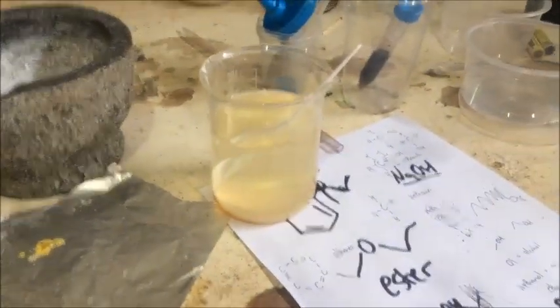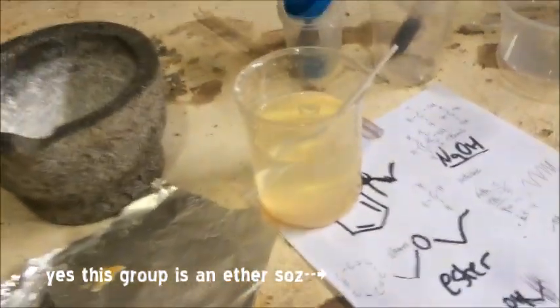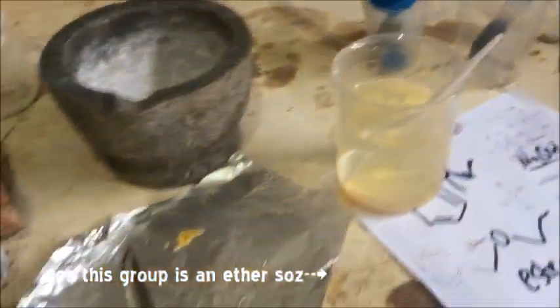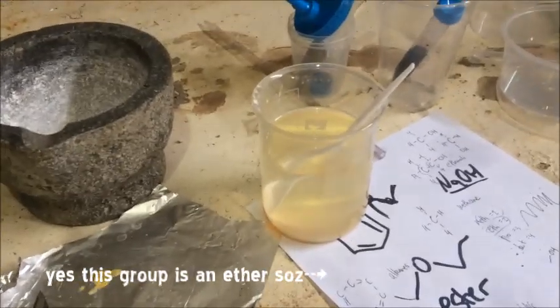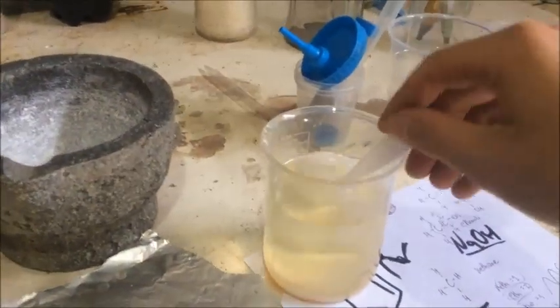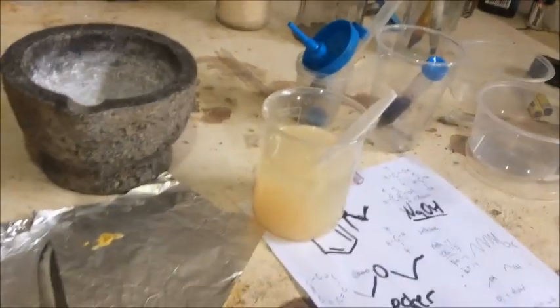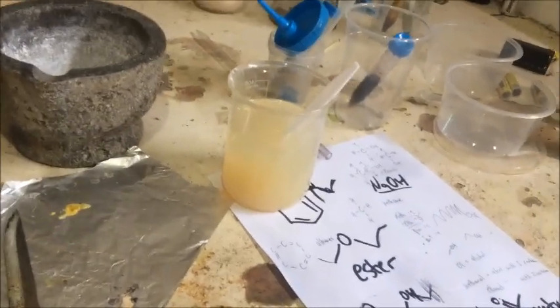Something more infuriating — this is another failed tetrazole container. I don't know what's happening with this last step. I cannot get it working. I've tried it probably four times now. I'm about to remake the aminoguanidine bicarbonate. It makes me mad — I cannot get it to crystallise out. I'm thinking it's not cyclising. I've tried everything. This is just some crap at the bottom here.